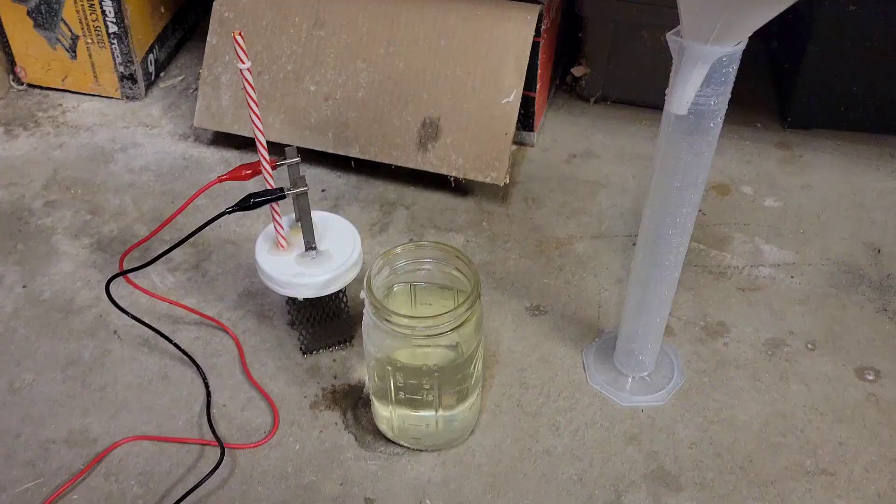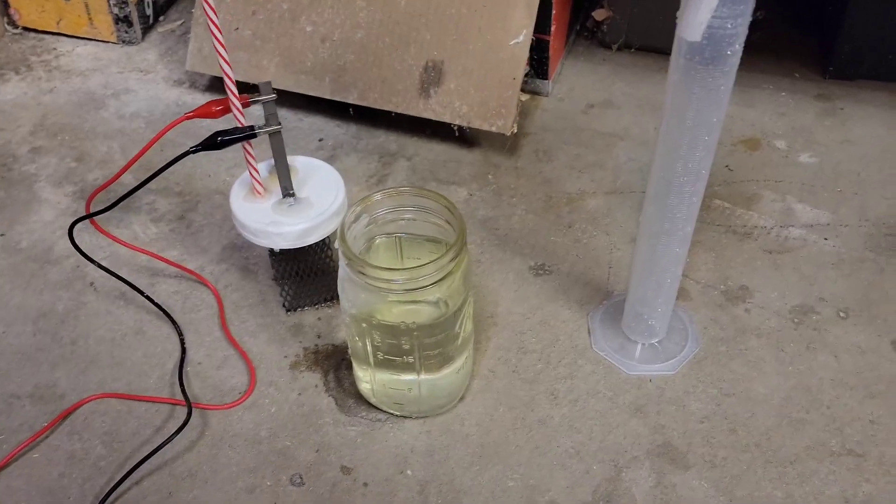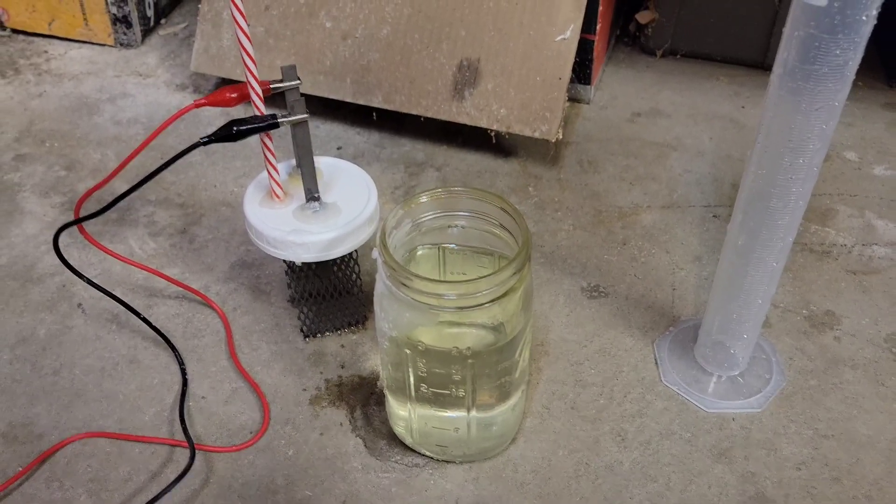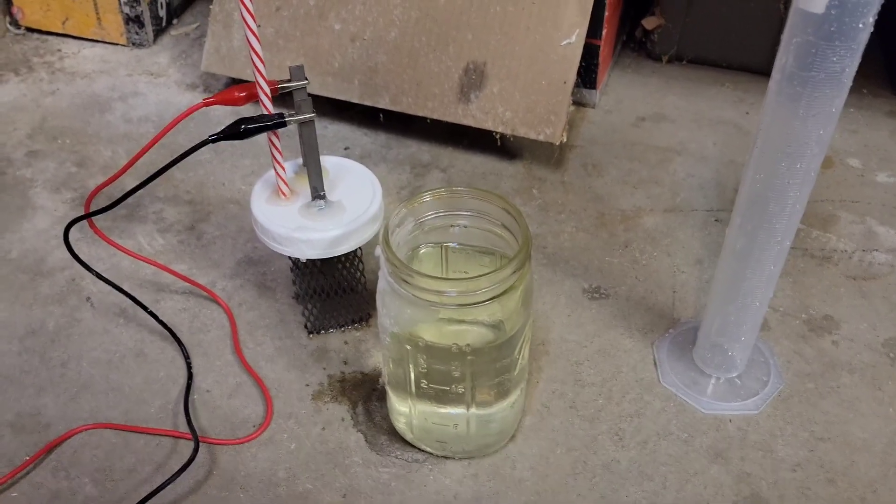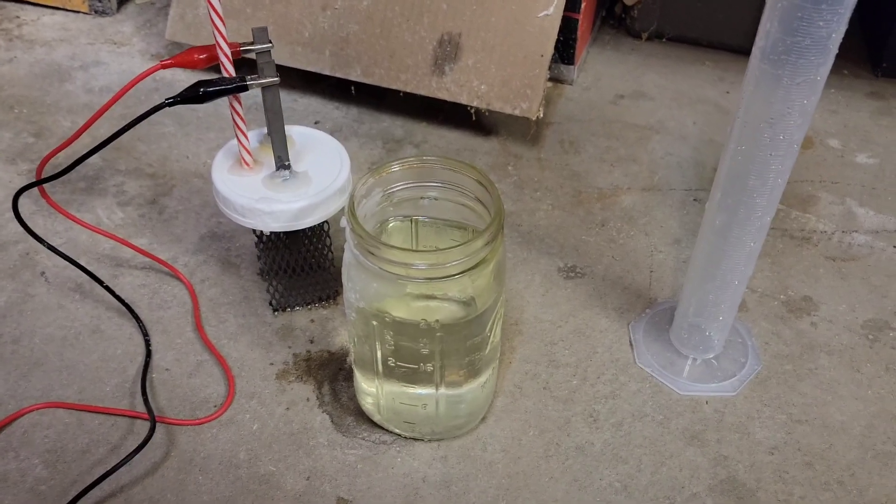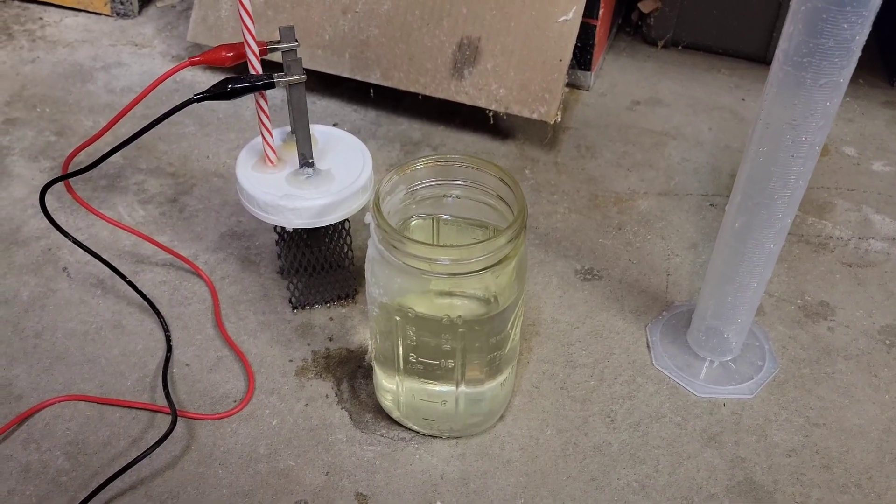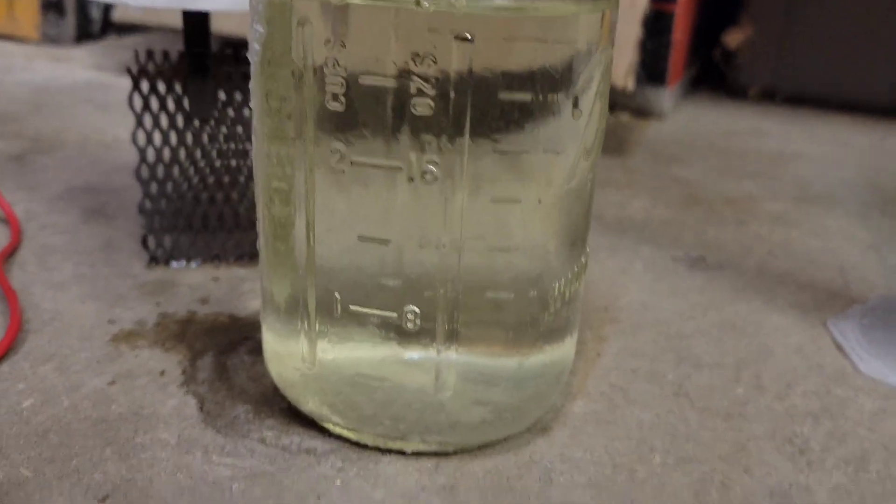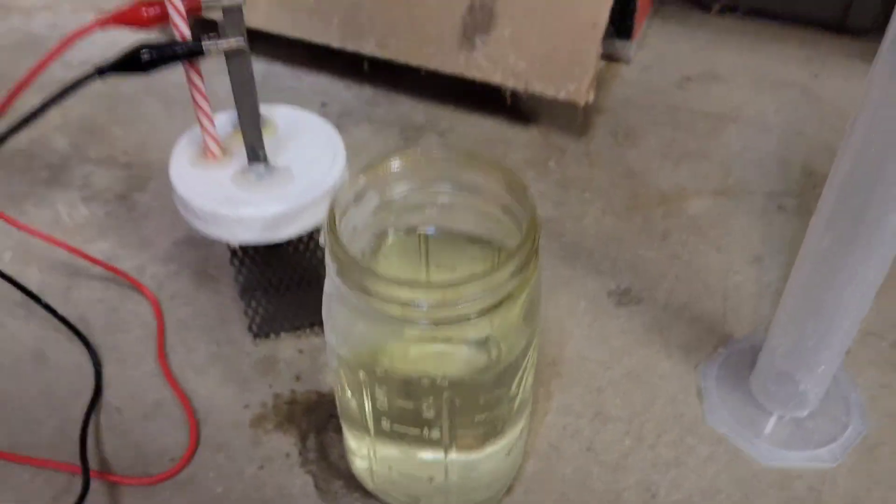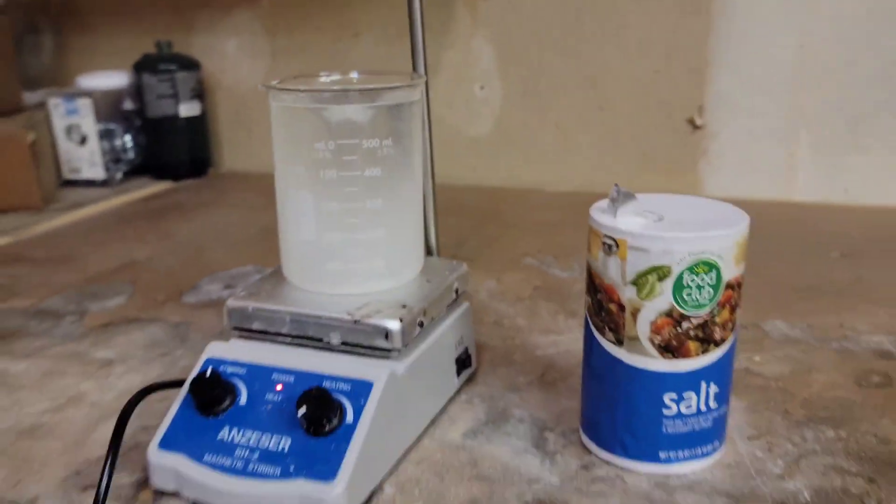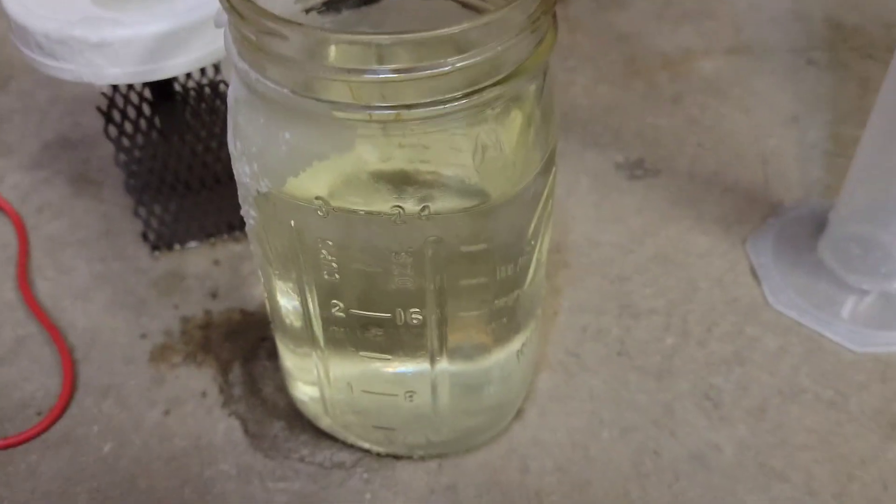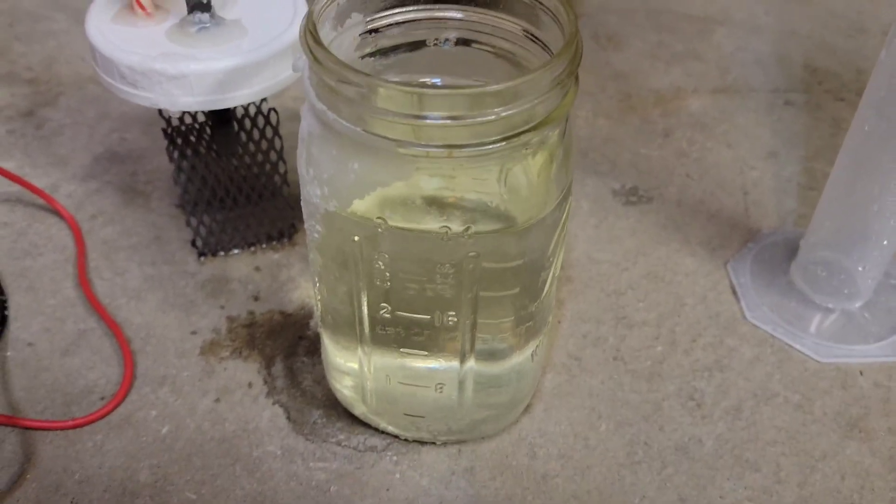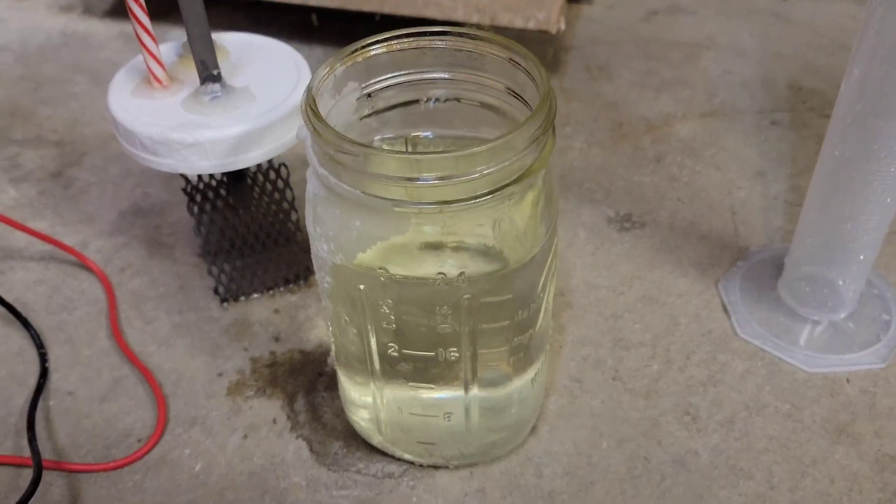A word of note that might be important to know is this solution after it's been run for a couple days actually contains a lot of hypochlorous acid, and that's also known as bleach. So you can kind of see the off yellow color to this. If that gets on your clothes it will absolutely bleach it, so be a little bit careful not to spill any of that on you.